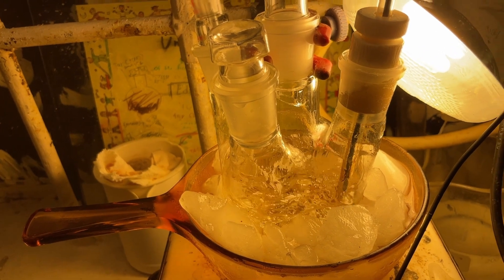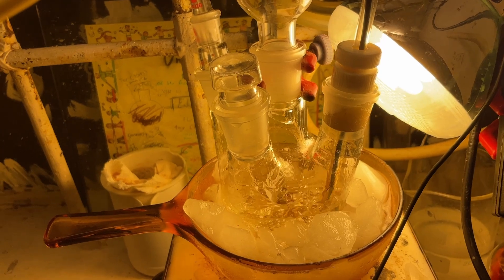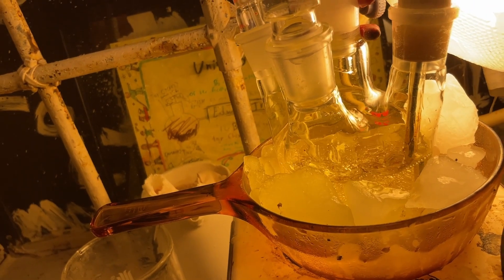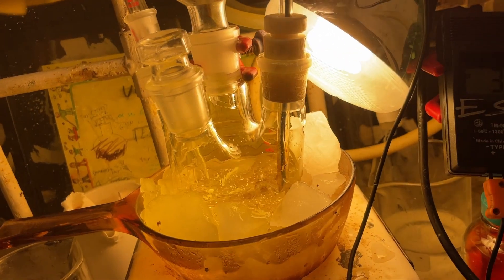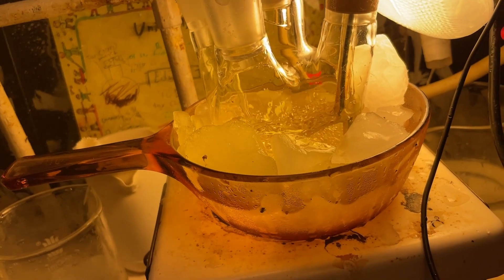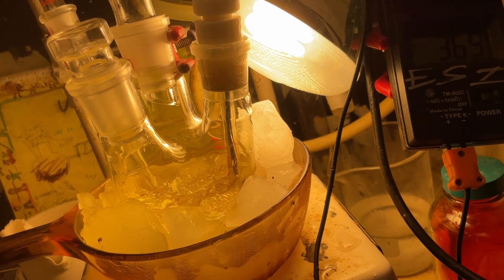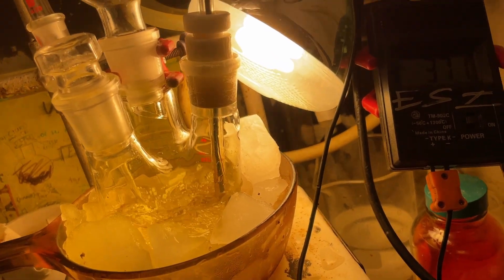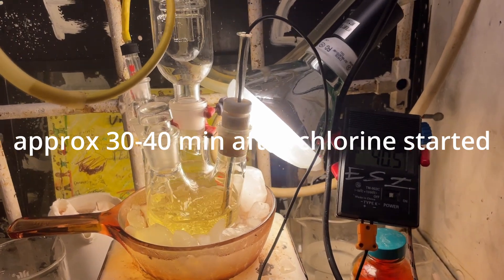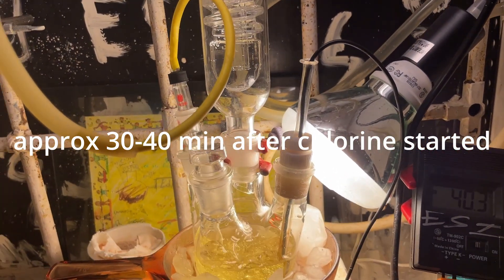So yeah, I guess the reaction's working fine. It's just the generator overflows slightly, and the solution now looks like very old piss. So I think that's far too much chlorine. You know what, f*** it, I'm just gonna let it go to whatever temperature it wants to. I think the reaction's fine.